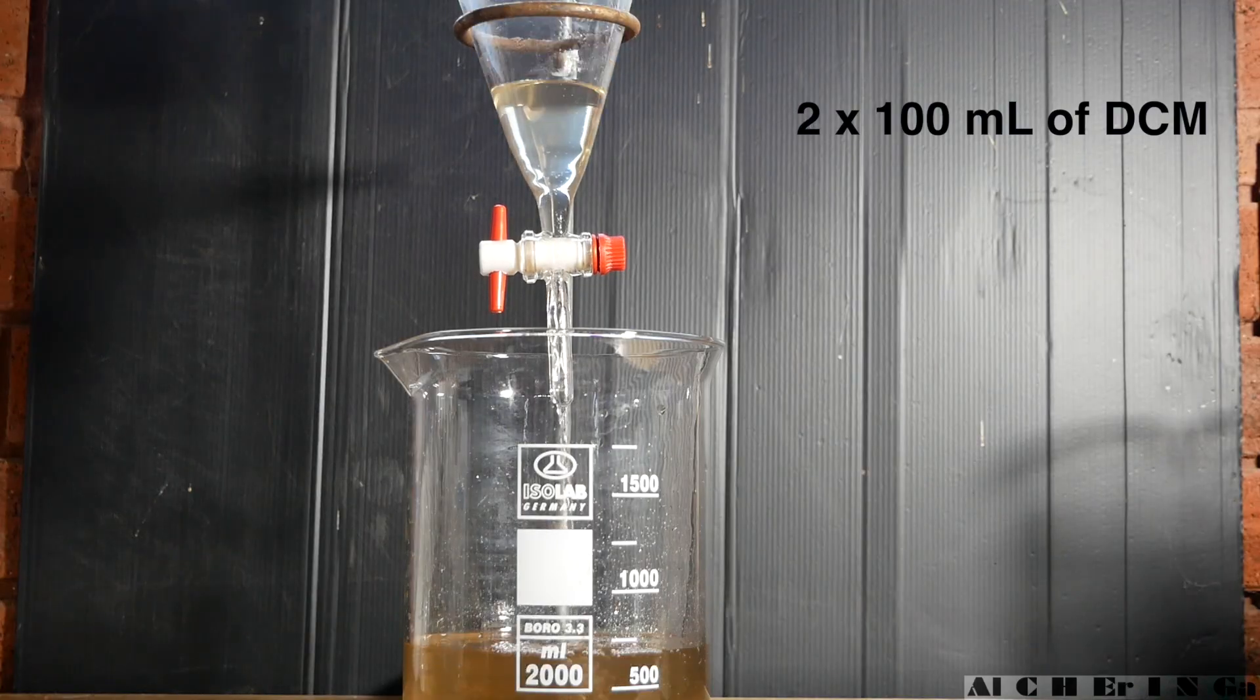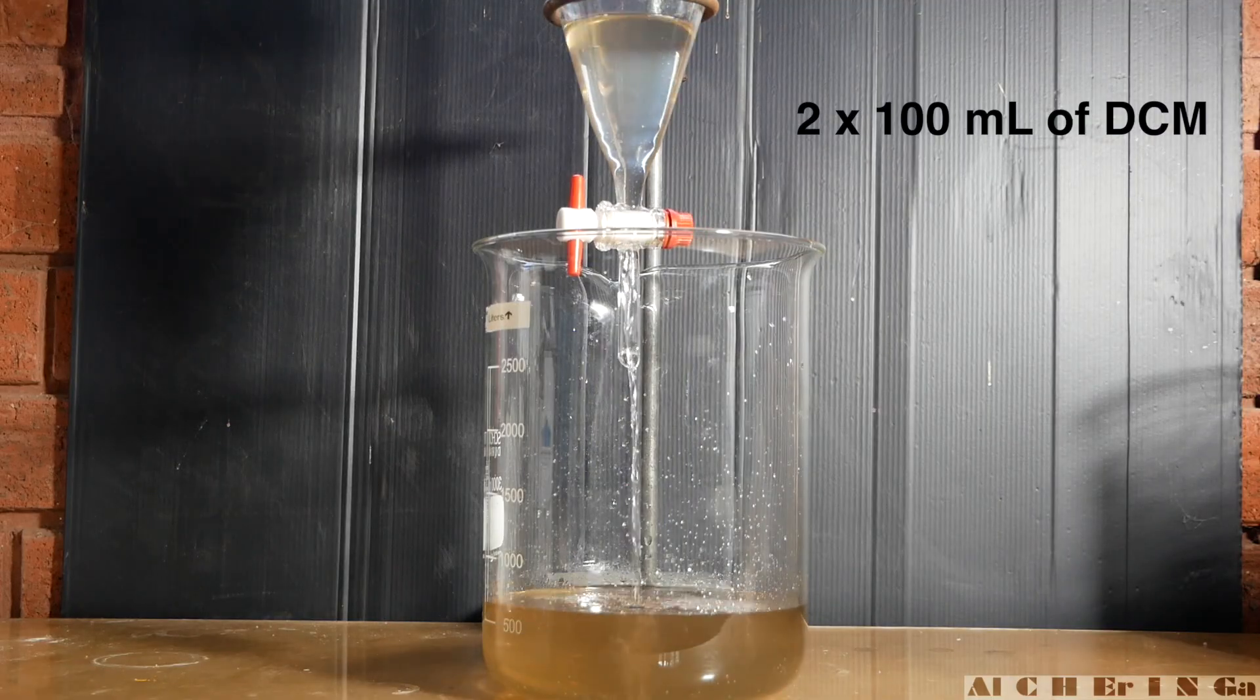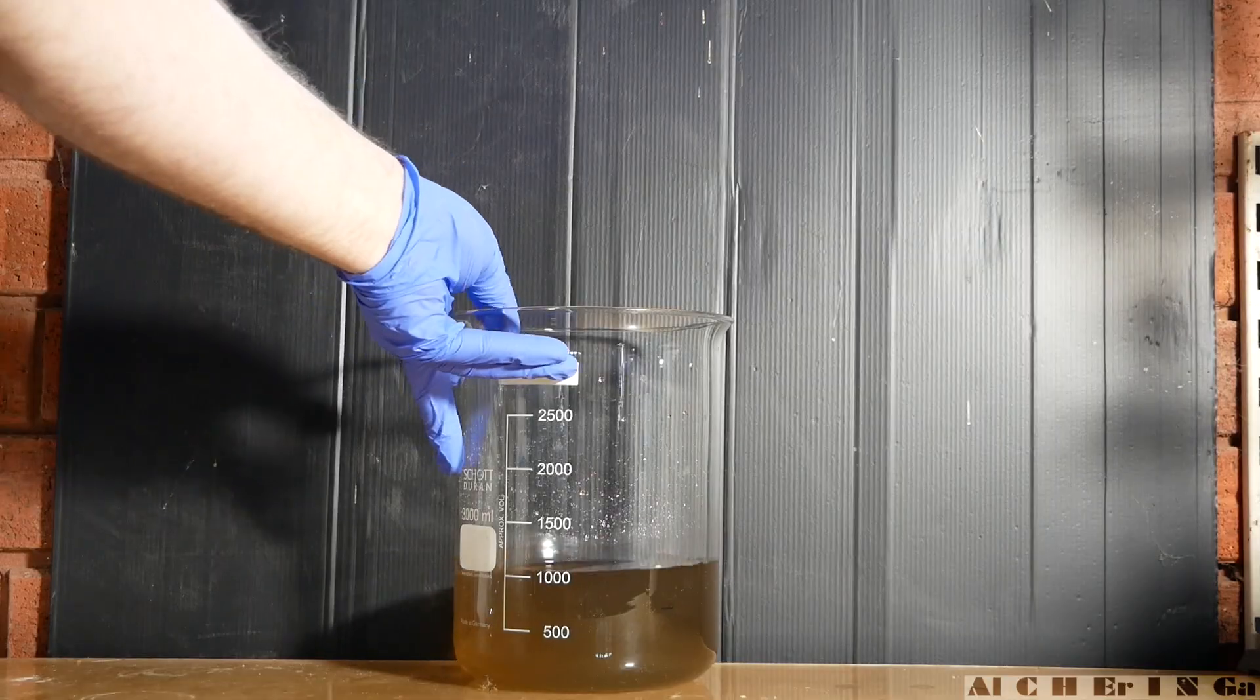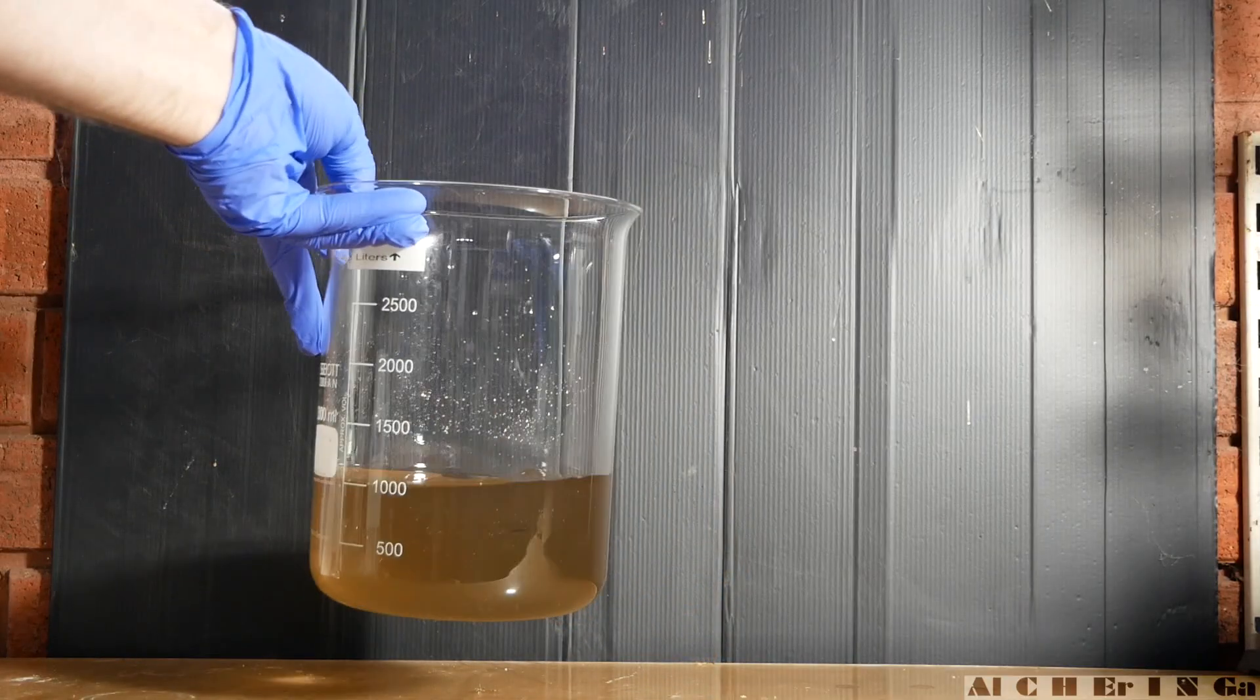Carry out another two more extractions with 100 milliliters of dichloromethane each. This is now a cleaned aqueous solution free from 1-phenyl-2-propanone.